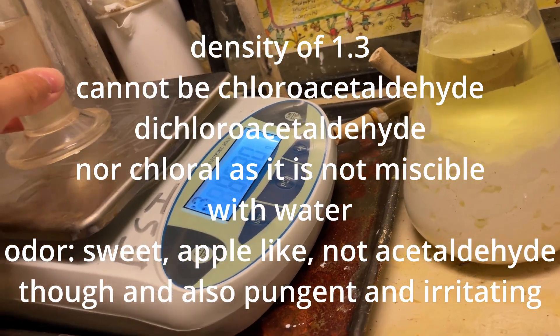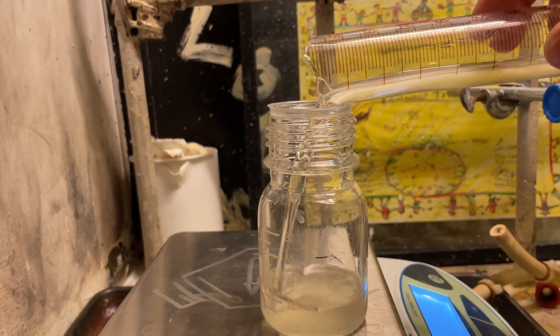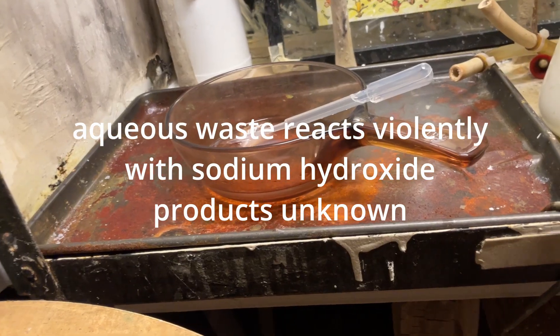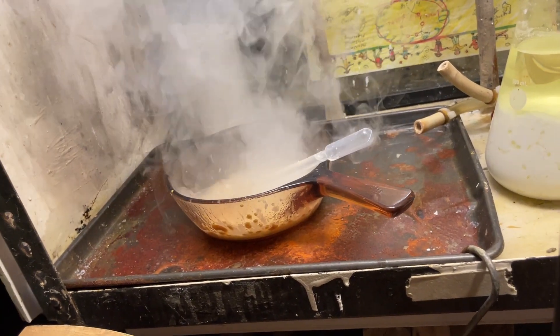But, I mean, I guess I'll just call it here. I mean, whatever I get, whatever I get. I need to weigh it. 3.25 milliliters. I need to stop doing that.